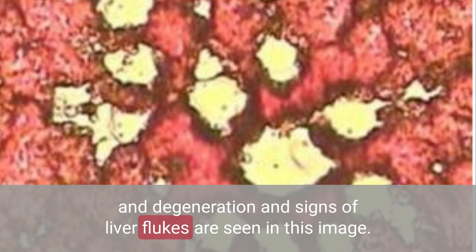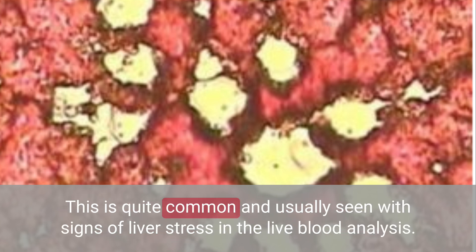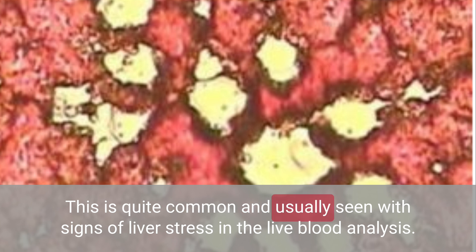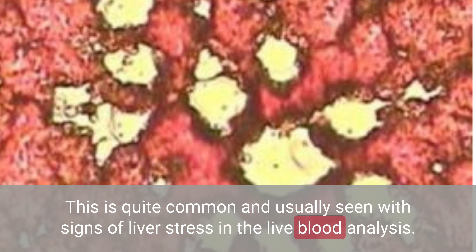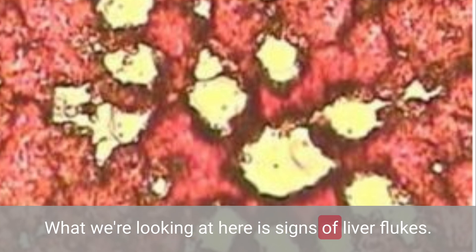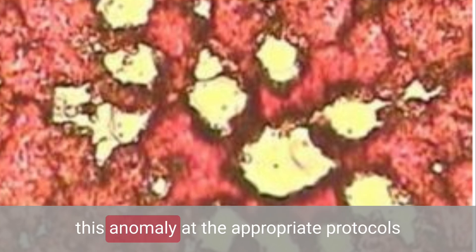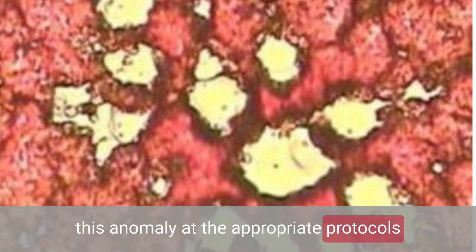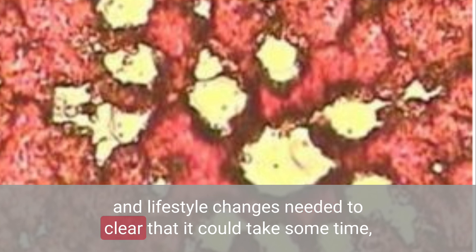Signs of liver flukes are seen in this image. This is quite common and usually seen with signs of liver stress in the live blood analysis. Information is provided on the training course on how to identify this anomaly and the appropriate herbal protocols and lifestyle changes needed to clear them.